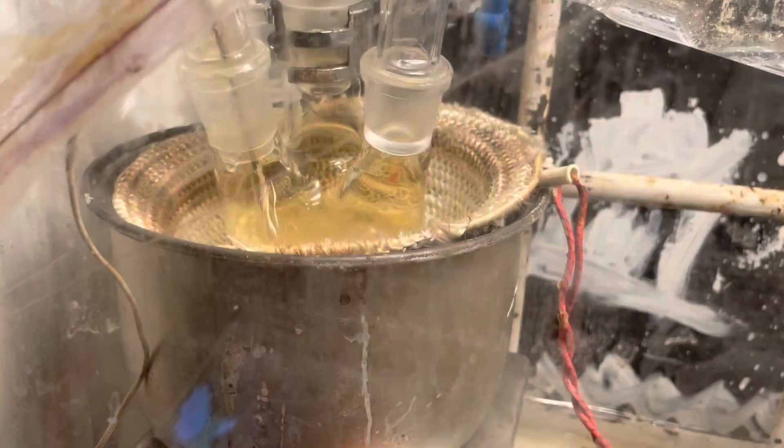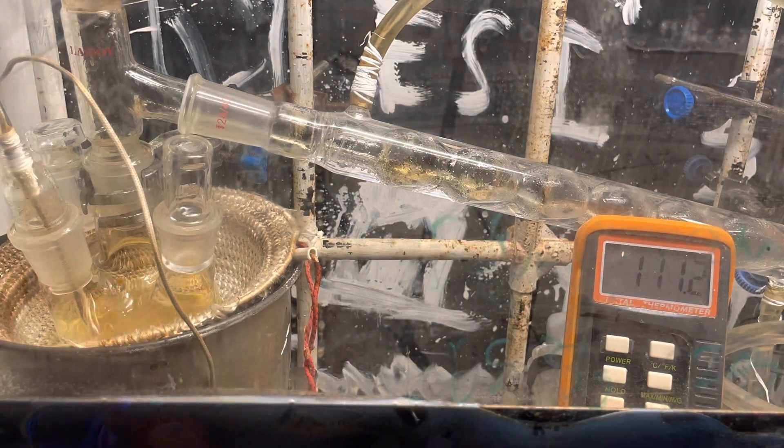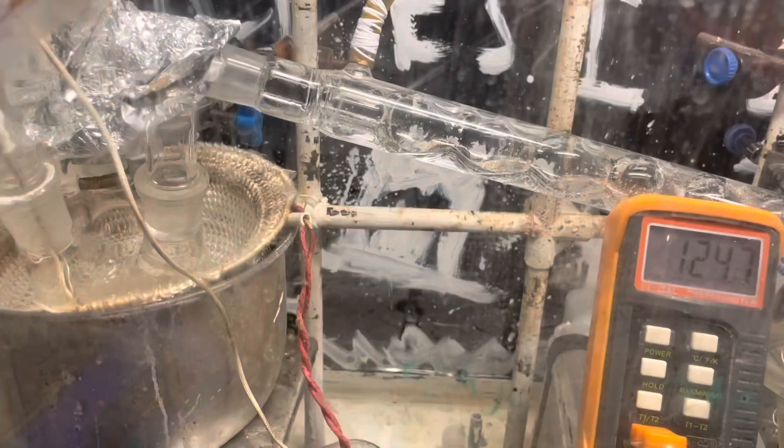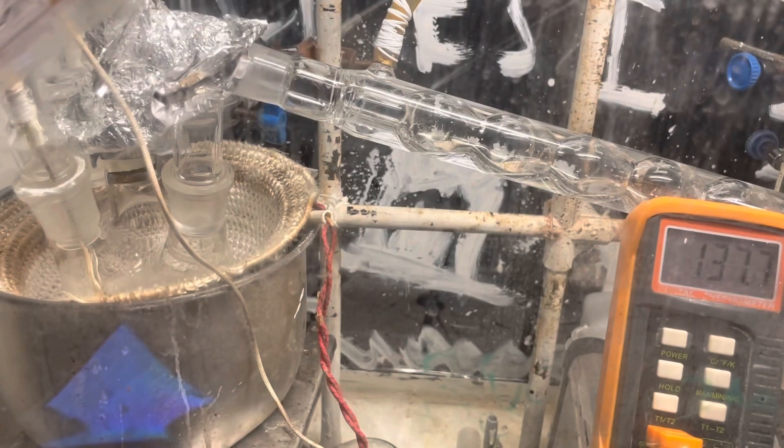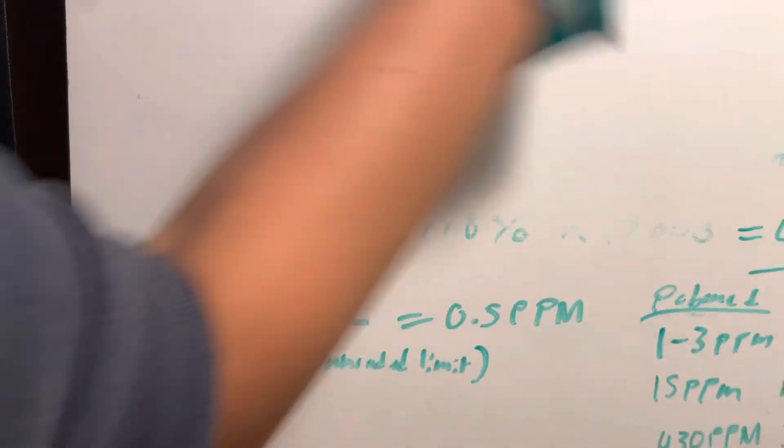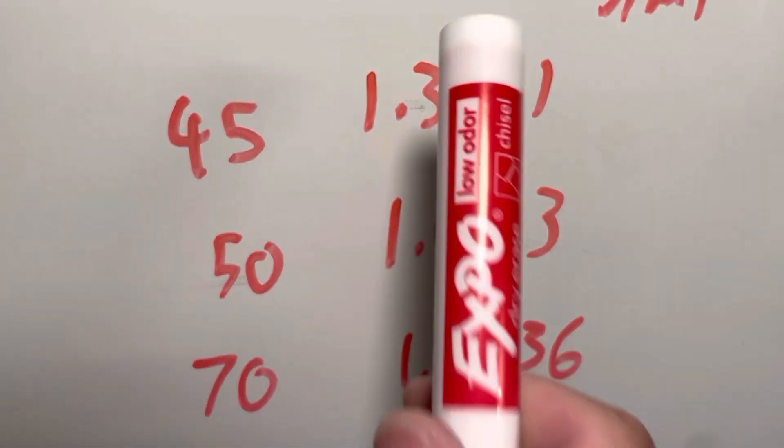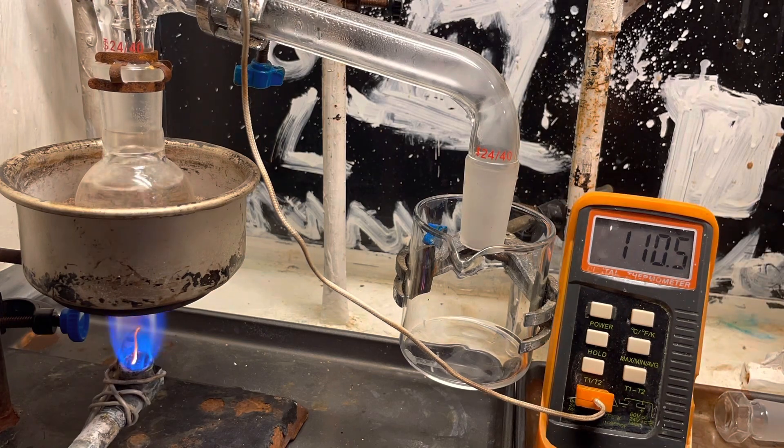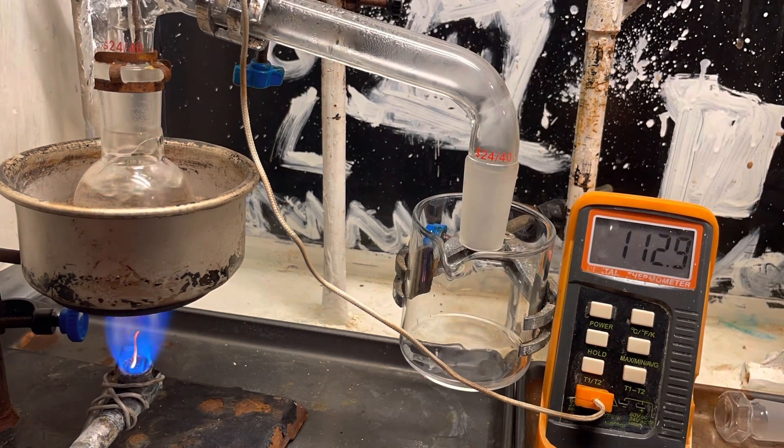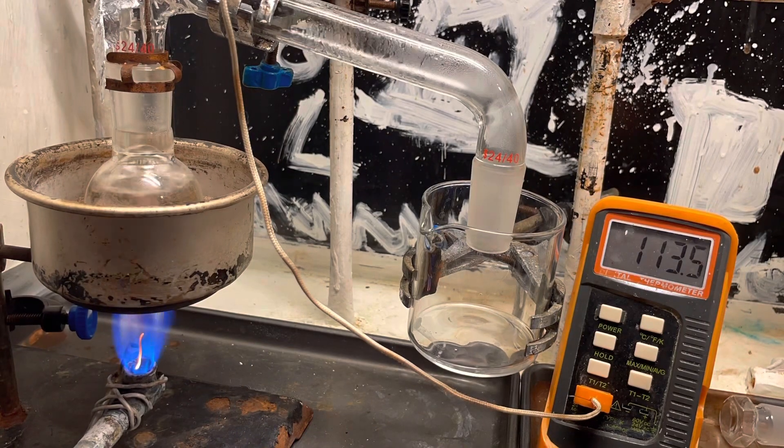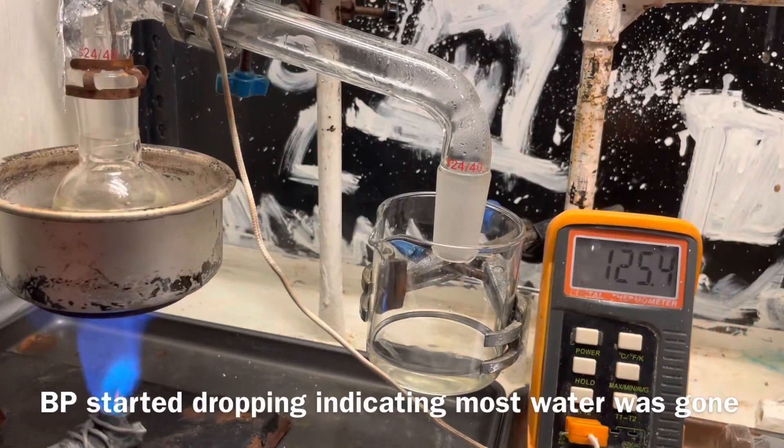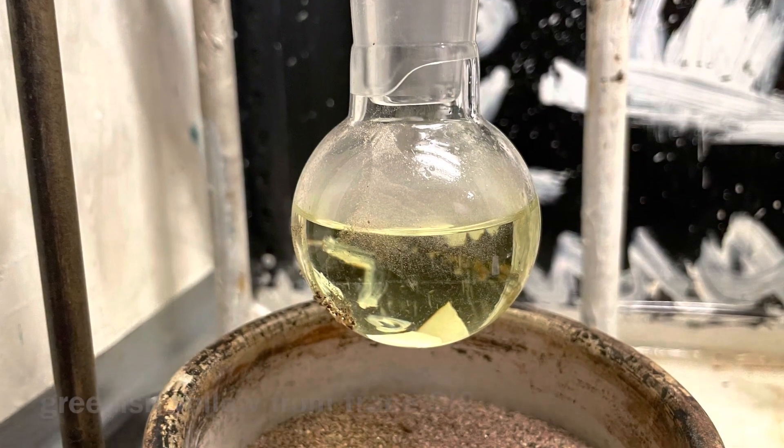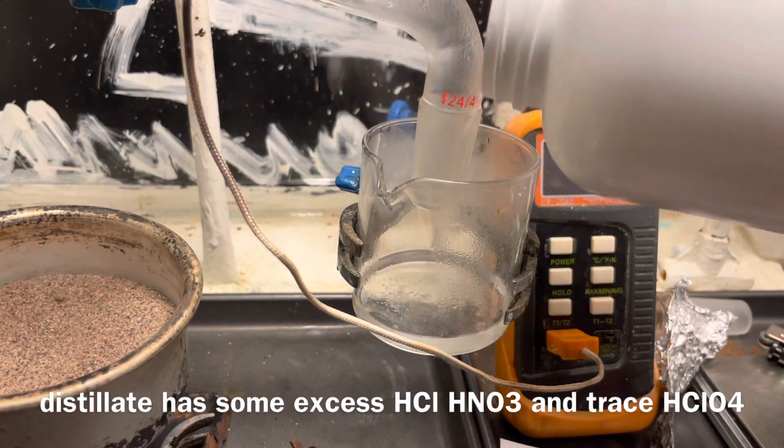So, yeah. Anyways, after that, after all the hydrochloric acid has been added, we're going to add a thermometer to the flask and heat it to drive the water off. The prep chem procedure says that you can heat it up to 135 to 140 Celsius to boil off all the water, but I found it was not sufficient to be even close to 70%. It was rather like 50, 60%. So I set up an air condenser and a sand bath with all the acid and a 50-milliliter round bottom flask. And in a sand bath, because a 50-milliliter flask and a one-liter mantle is just stupid, I distilled it so that eventually the boiling point actually plateaued and started dropping because I could not provide enough temperature to boil the perchloric acid itself. But this should drive pretty much all the water off.